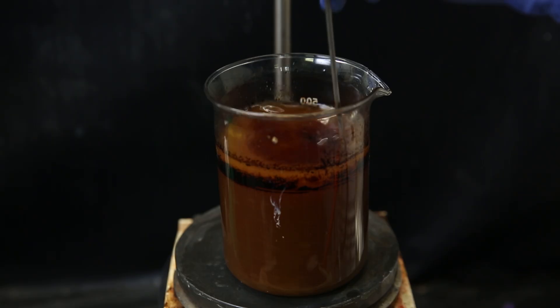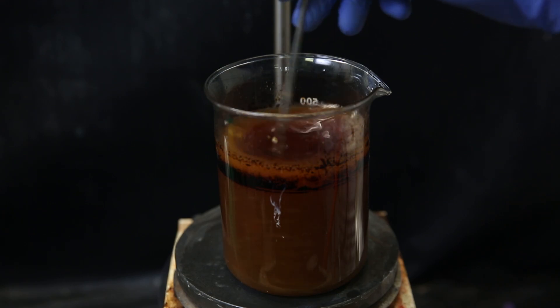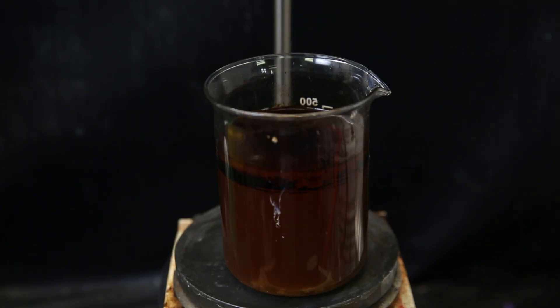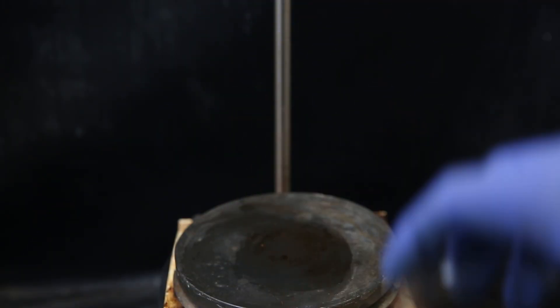Normally the addition of sodium hydroxide to water is exothermic, and it dissolves easily, and it should also quickly react with acids. But here, it wasn't. And even after diluting the solution with some water, there did not seem to be an effect. The remaining solid sodium hydroxide on the bottom also didn't want to dissolve in pure water after I took it out, which was very confusing. Since it was behaving so annoyingly, I just used the neutral solution and hoped most of it could be extracted.